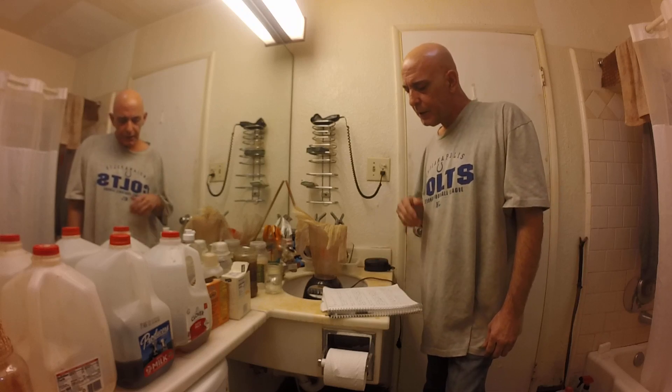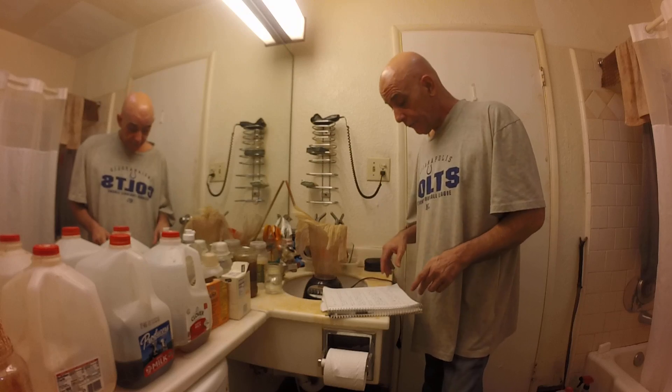I'm going to add just a little bit of salt water, then wait and watch and see if it takes off. Then add a little bit more after a few hours if that doesn't start. I'm going to keep doing that, looking for a slow reaction that grows me long, strong, hearty crystals. When I have what looks like a dish of fiberglass, then I know I've done it right.